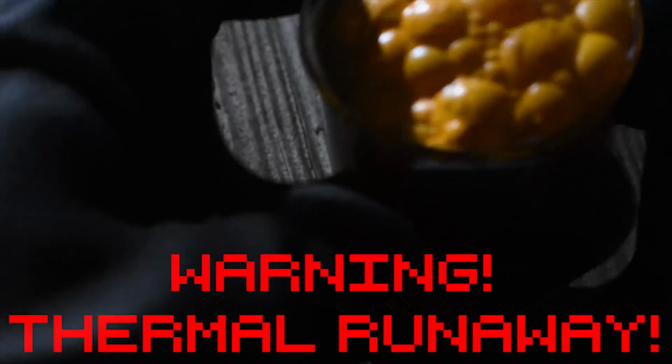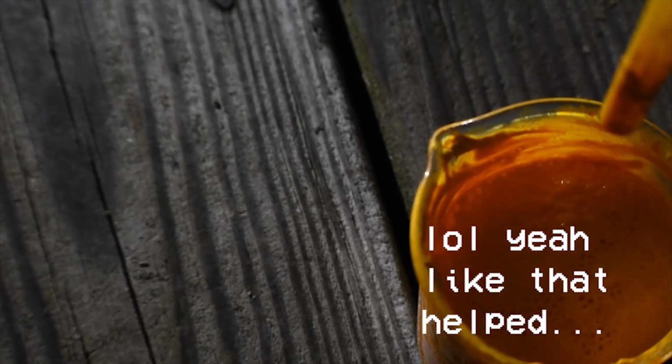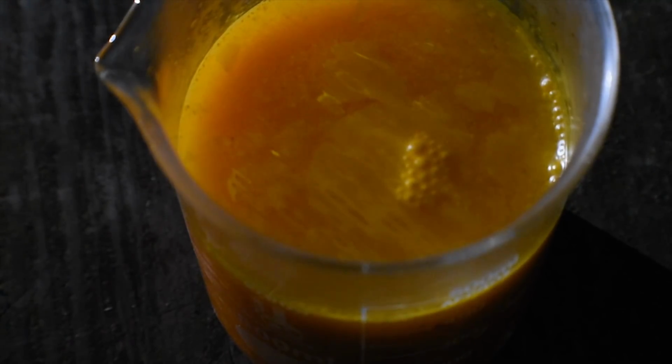Whoa, fuck. Shit. No, don't do this to me. Abandoned ship. Ah, fuck. I had to do it, but I dumped everything into the dilute hydrochloric acid. It was experiencing a runaway reaction. Son of a bitch, I've never experienced that before, so let me go ahead and dilute this with some more water to make sure I don't lose anything else.